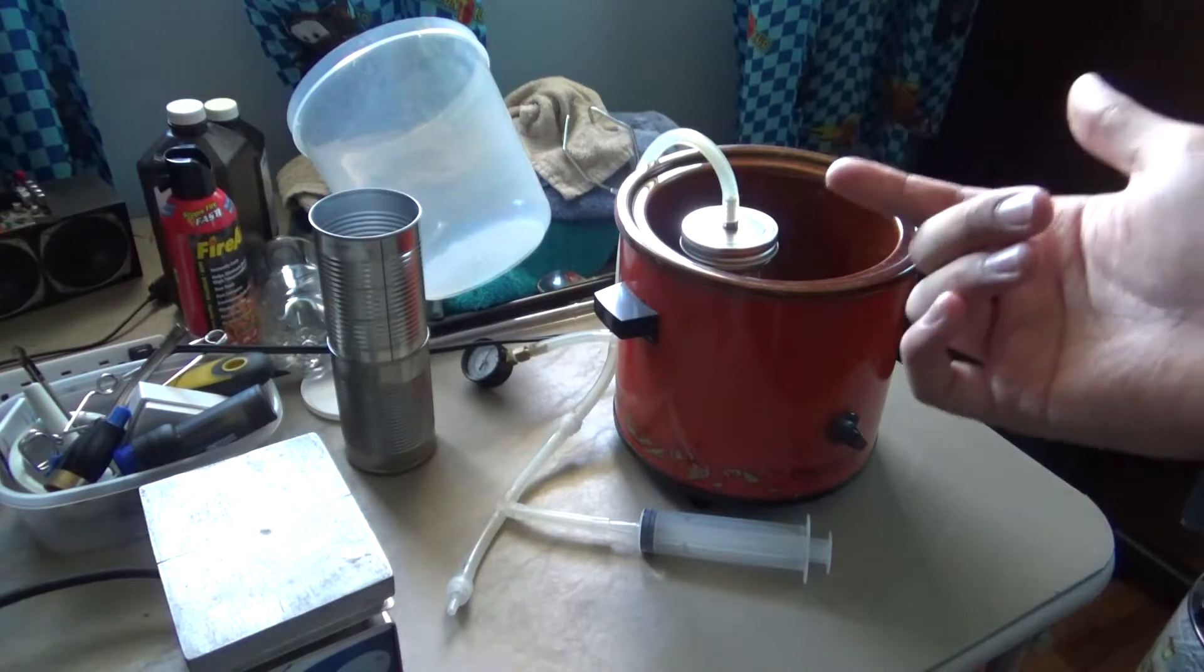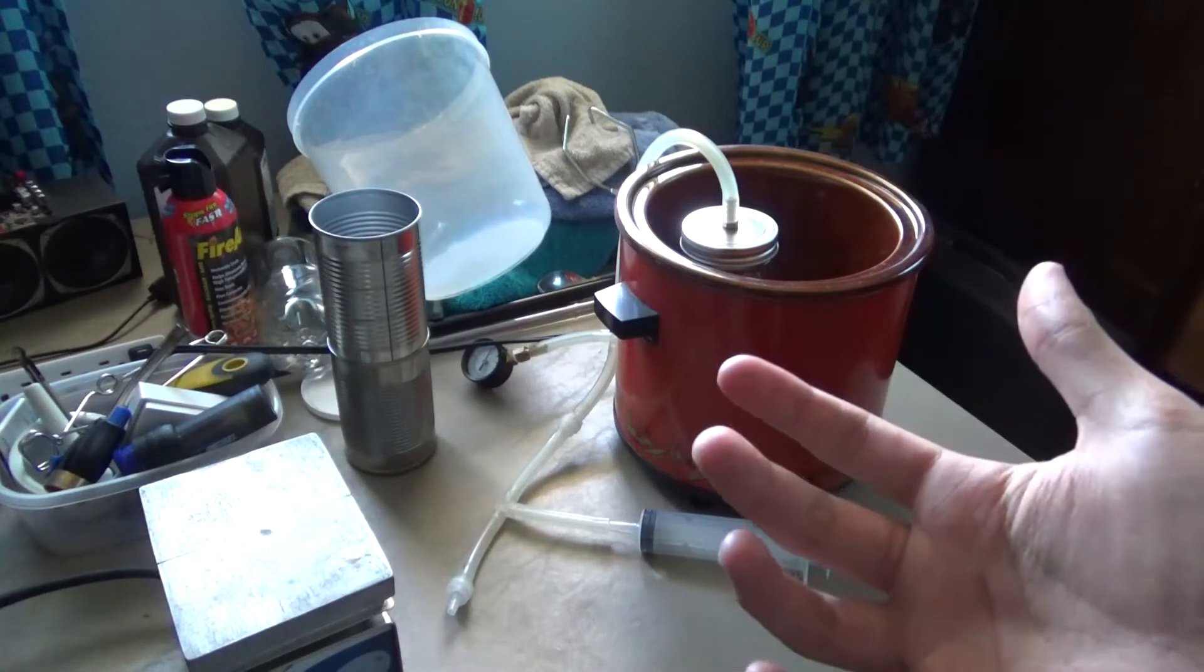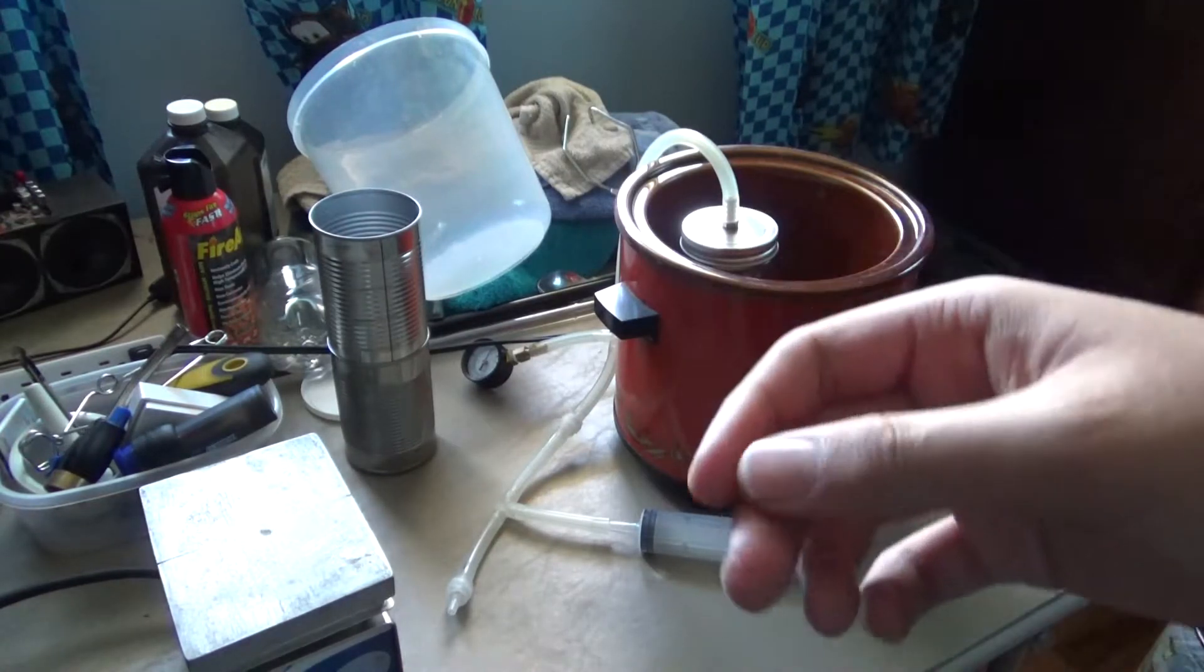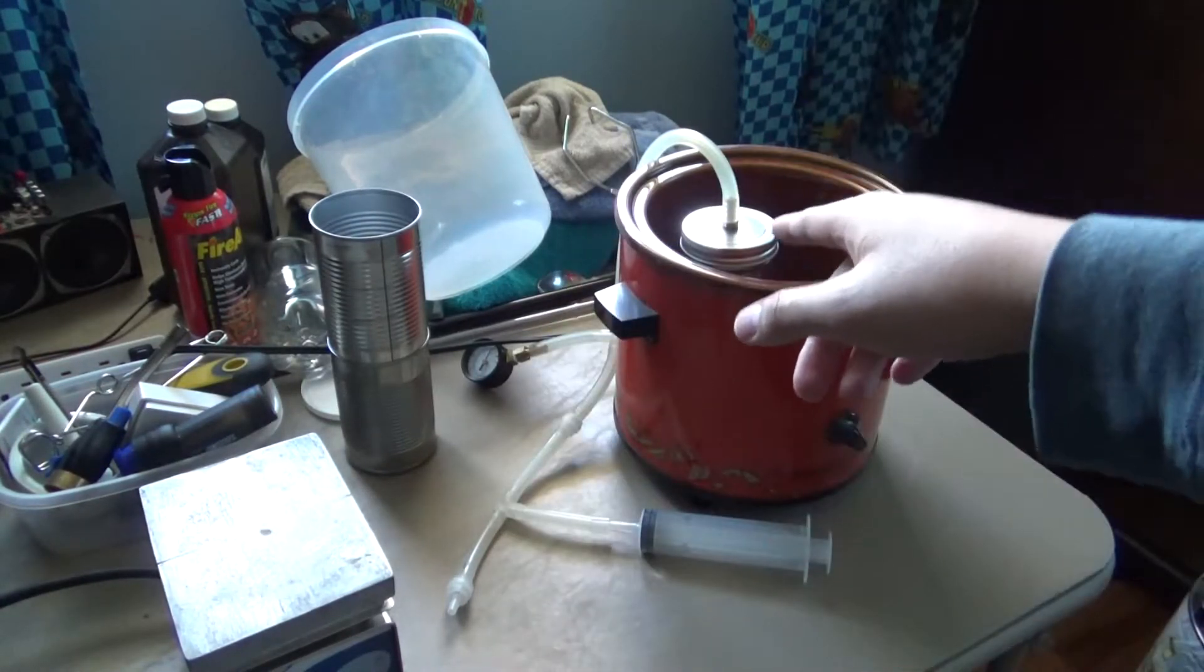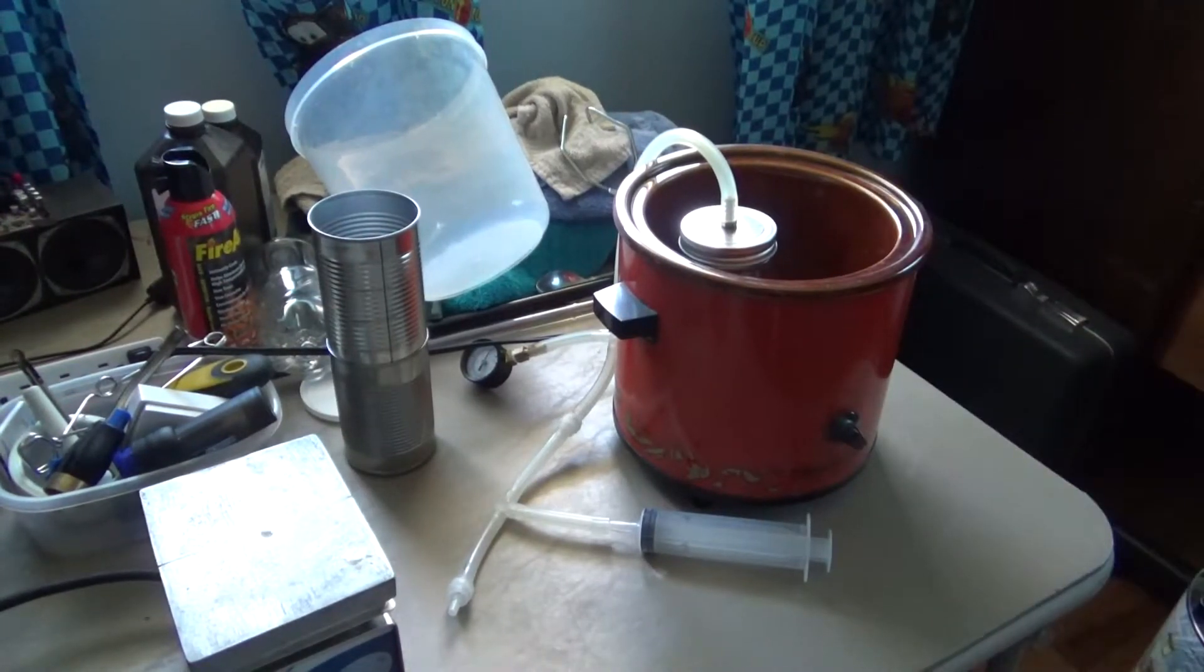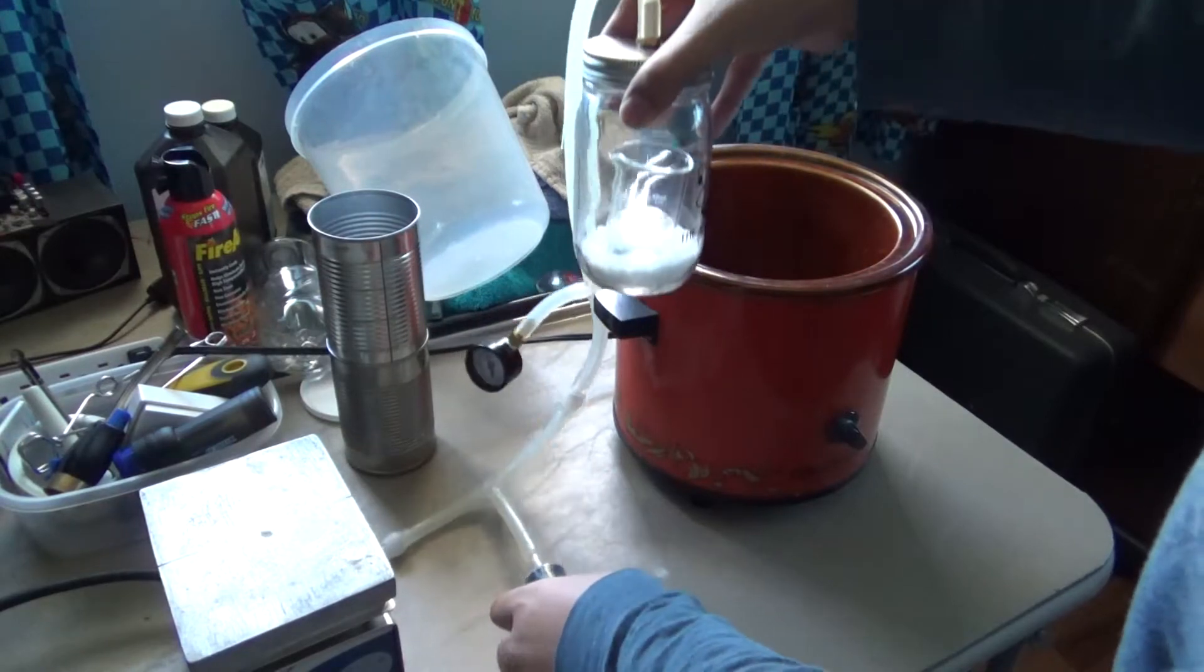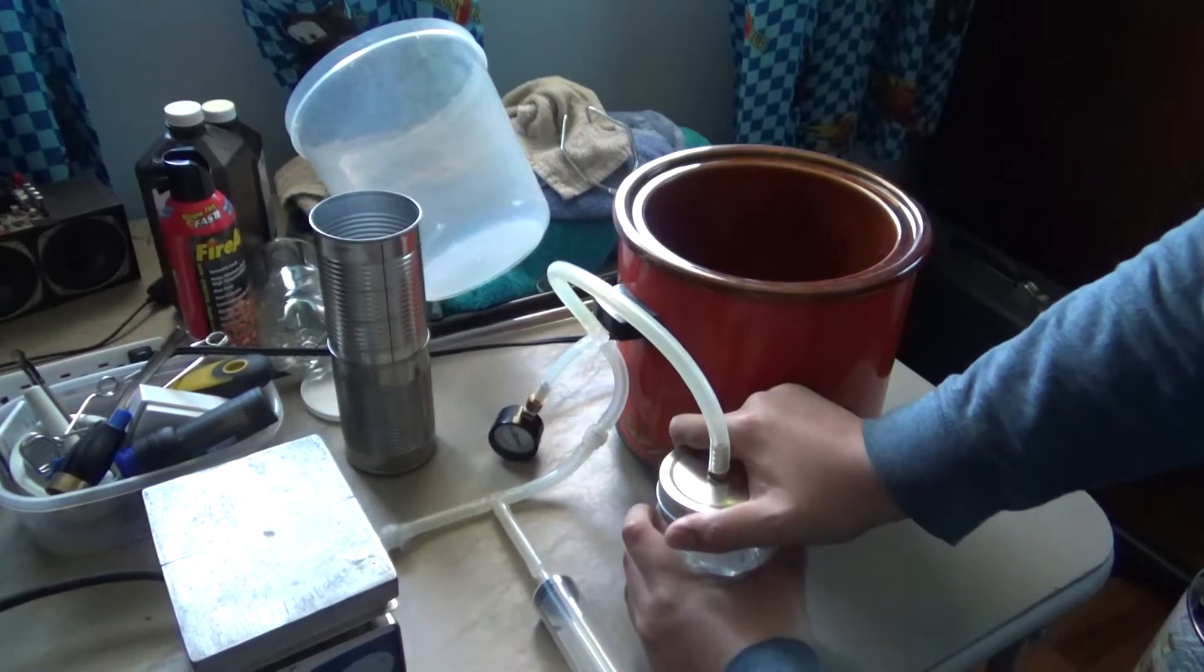As for my current hypothesis, I'm hypothesizing that the sodium hydroxide is actually going to be heavier and probably differing in shape. To be honest, I already have seen the sodium hydroxide, and you might be interested to see what it looks like. Unfortunately, I forgot to measure the sodium hydroxide's mass before I put it in there, so we can't actually be that scientific about it. But we can still observe. So it'll be more of a qualitative analysis. Okay, so I'm going to bring this out and actually take the cover off. I'm going to crack this open, first time since last night. Oh, it's really on there. Alright, there we go.